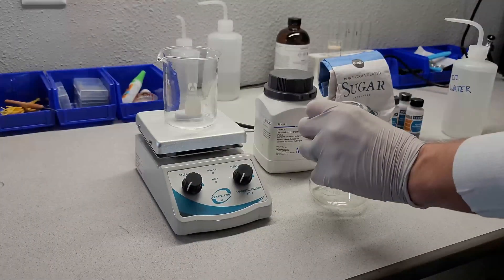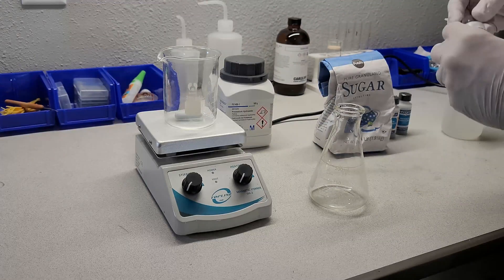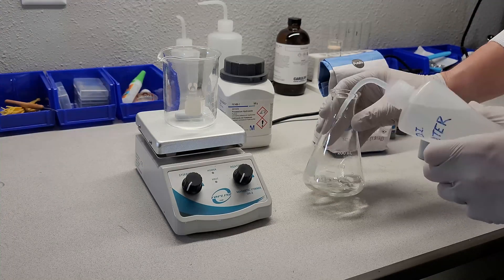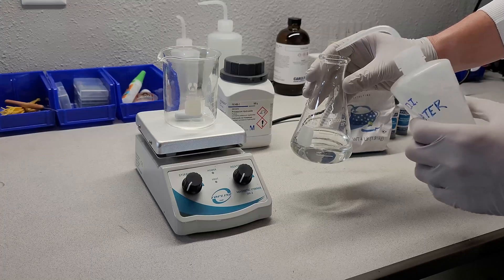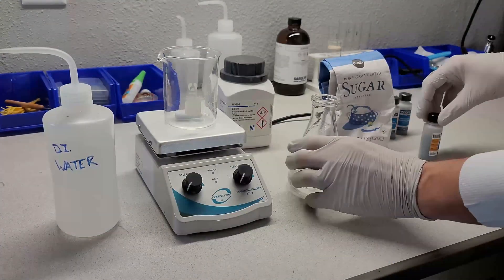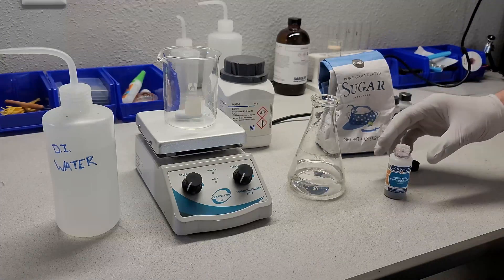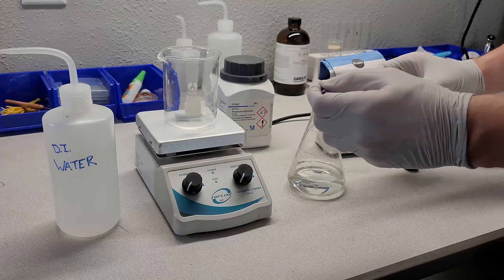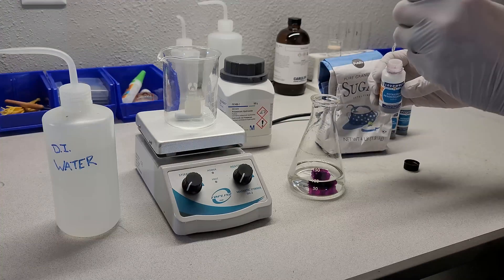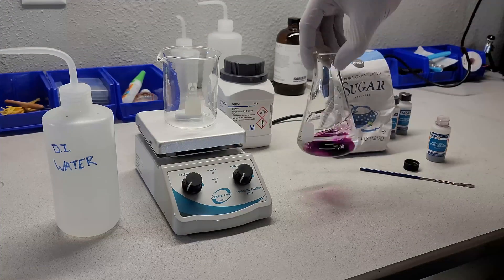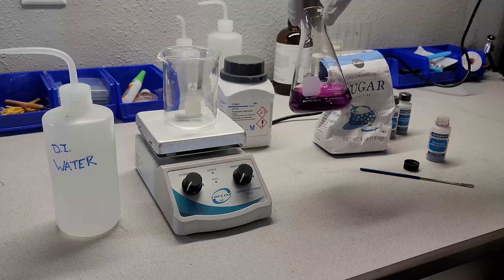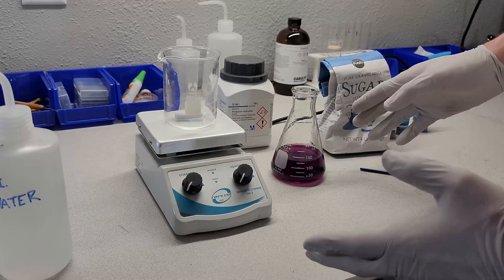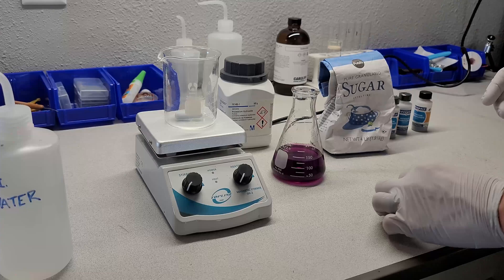So to start things off, I'll take my little Erlenmeyer flask here, and to that we'll add about a hundred mils of water. Then we're going to take a little bit of our potassium permanganate. We don't need much. Just enough to make everything turn a nice pretty purple. Purplish pink. If you do too much, the colors will be too dark to see, and you don't really necessarily want that.